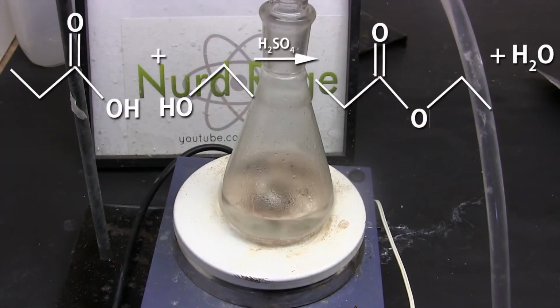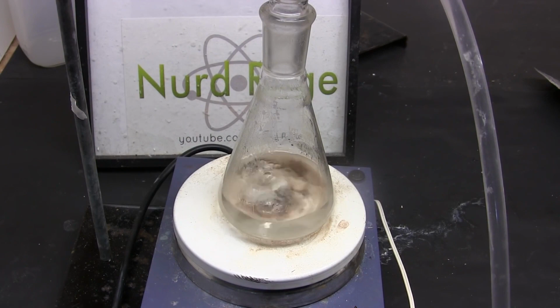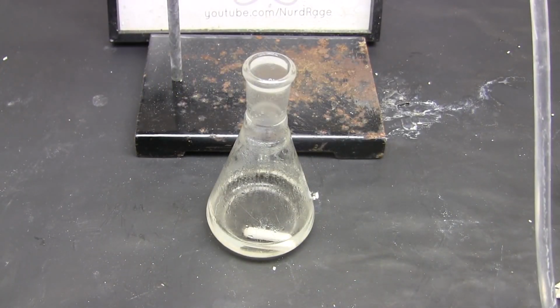What's happening is we're reacting the propionic acid with ethanol to form ethyl propionate and water. The sulfuric acid acts as a catalyst. I refluxed for 3 hours, but this might be excessive. Anyway, here we are after 3 hours of refluxing and the flask is cooled. I've also removed the reflux condenser.